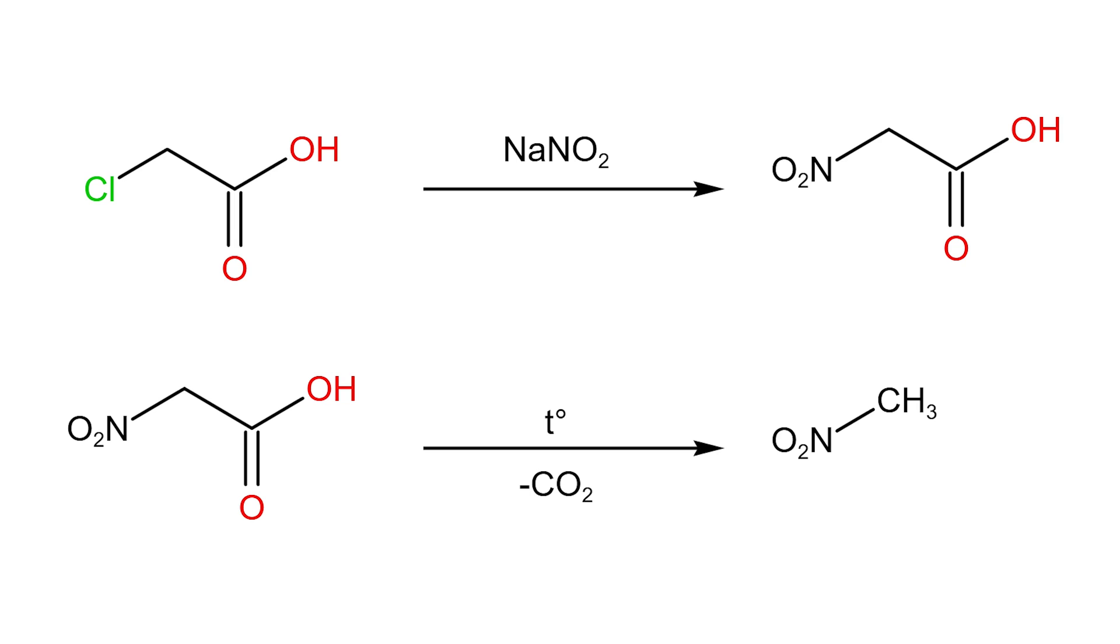Okay, so my plan to synthesize this chemical is to use chloroacetic acid. I will replace the chlorine atom with a nitro group using sodium nitrite. Then I will decarboxylate the resulting nitroacetic acid to nitromethane. Without further ado, let's get started.